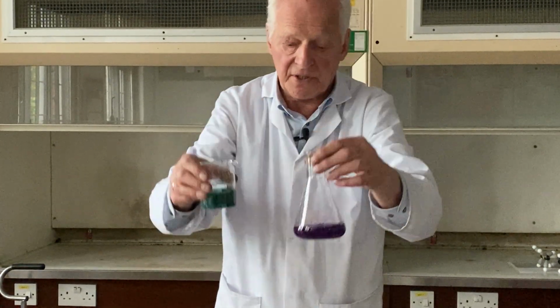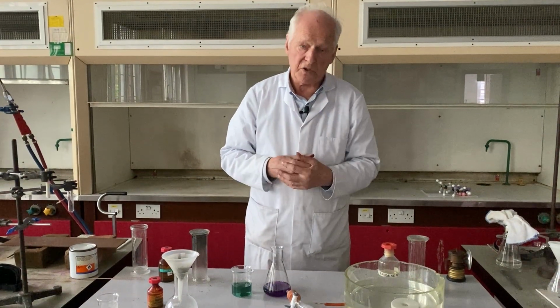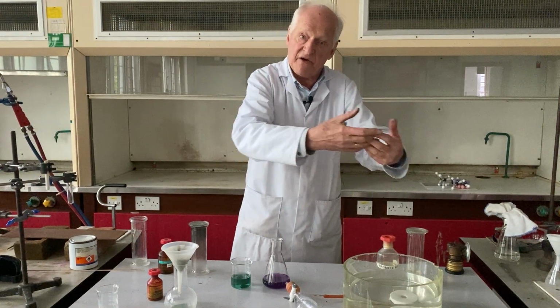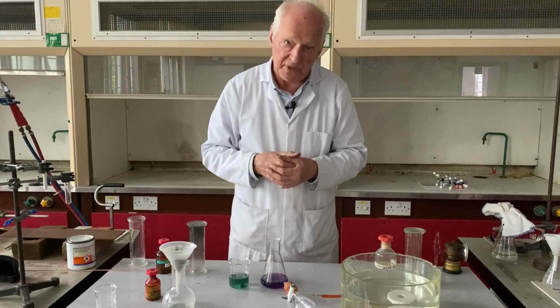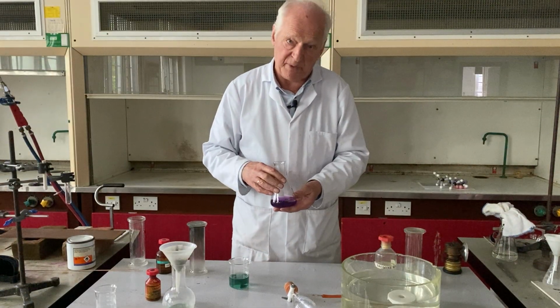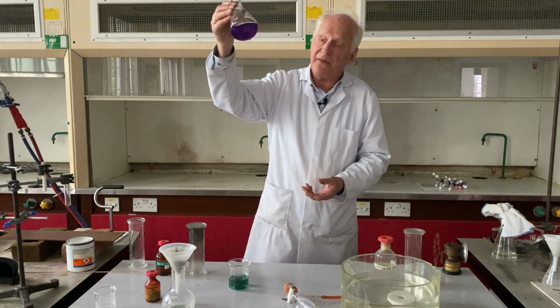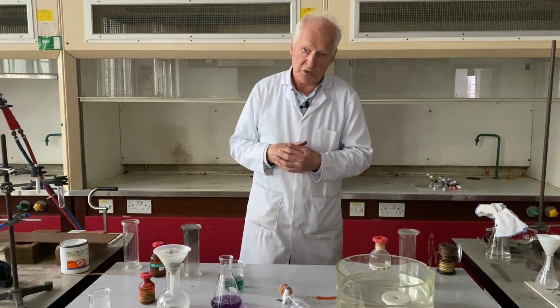And the reason is because in this reaction between calcium carbide and water, not only is the product acetylene or ethyne, which is incidentally a very interesting reaction because from an inorganic compound we have prepared a most important organic material composed of carbon and hydrogen only, C2H2. And in this situation, what gets left behind is calcium hydroxide, Ca(OH)2, otherwise known as lime water, which I have in here. And that is demonstrated by the fact that the universal indicator has turned purple.